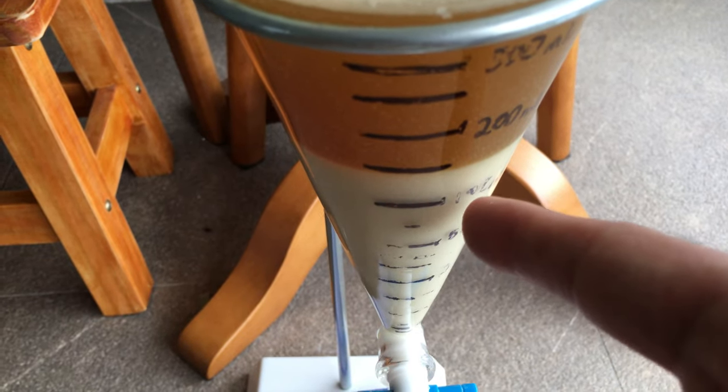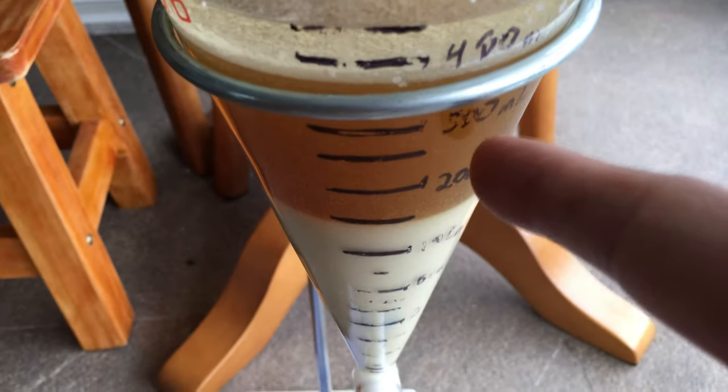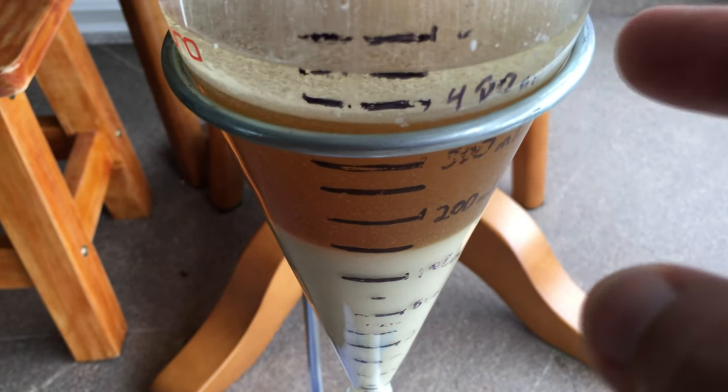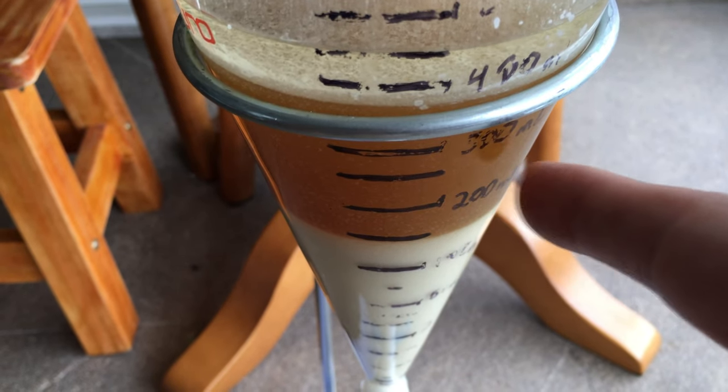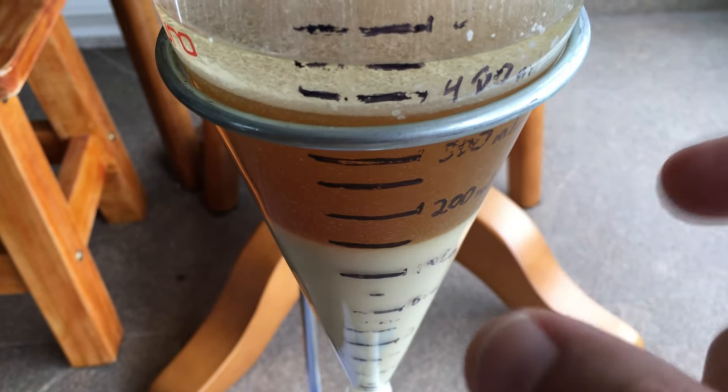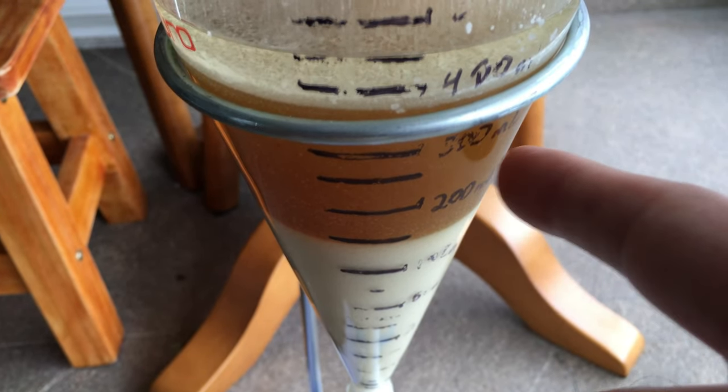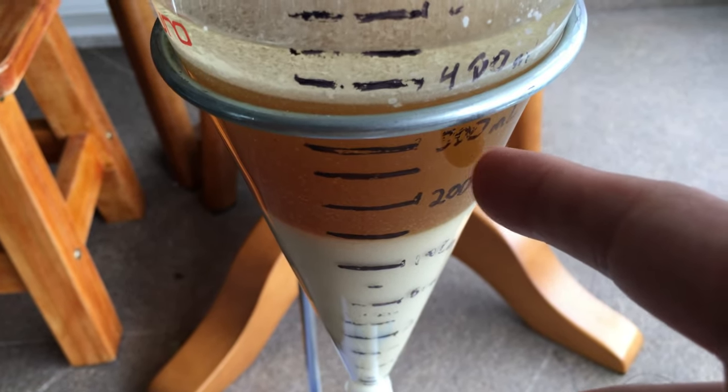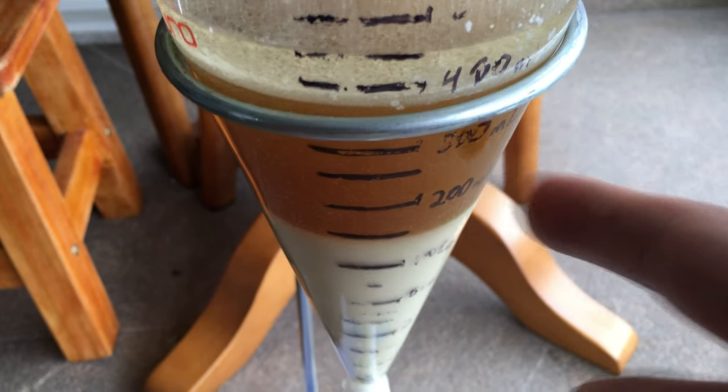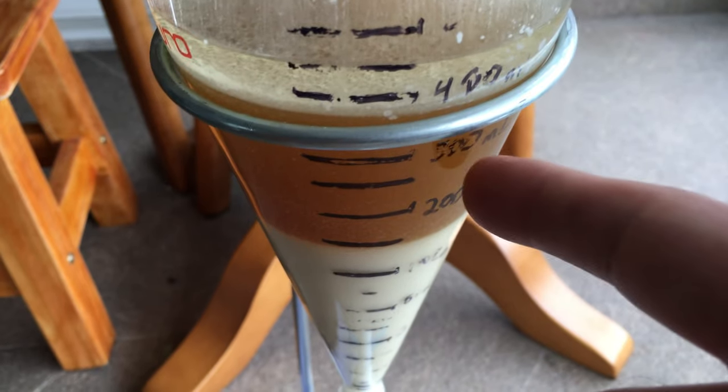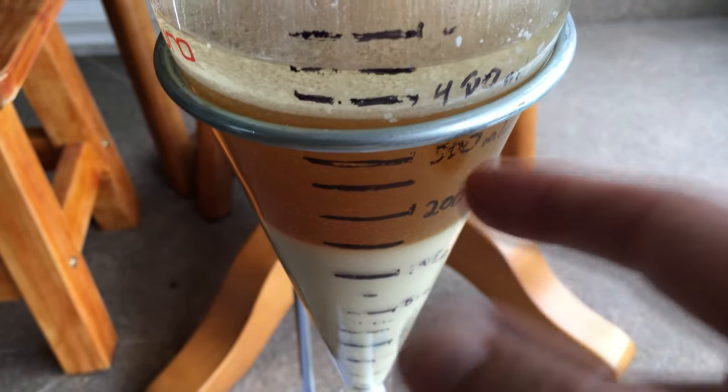In the future I remembered that I tried calcium hydroxide, but I was adding the powder directly to the reduced tea. In the future I'll make a saturated solution of aqueous calcium hydroxide which is very low, like one gram per 500 milliliters, but the pH is much higher. So I may need less of an aqueous solution to make the pH high enough.